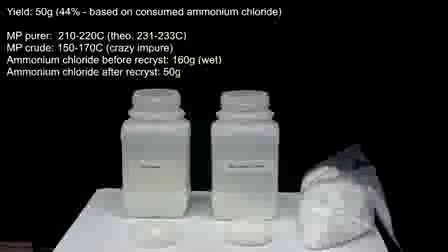In the end, we get a final yield of about 50 grams, which corresponds to a percent yield of about 44. In this reaction, we use a large excess of formaldehyde, and we also recover a lot of ammonium chloride, so the yield is based on the amount of ammonium chloride that was actually consumed in the reaction. This is pretty easily calculated by subtracting the amount of ammonium chloride that we recovered from the amount that we started with. According to OrgSyn and some other resources, the typical yield for this reaction is between 40 and 50%, so I'm pretty satisfied with what I got.